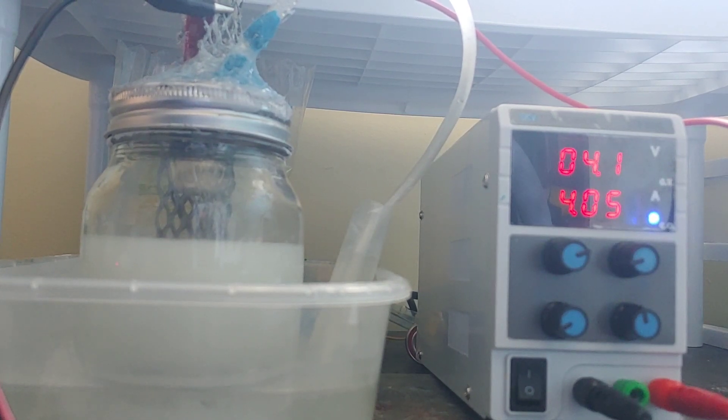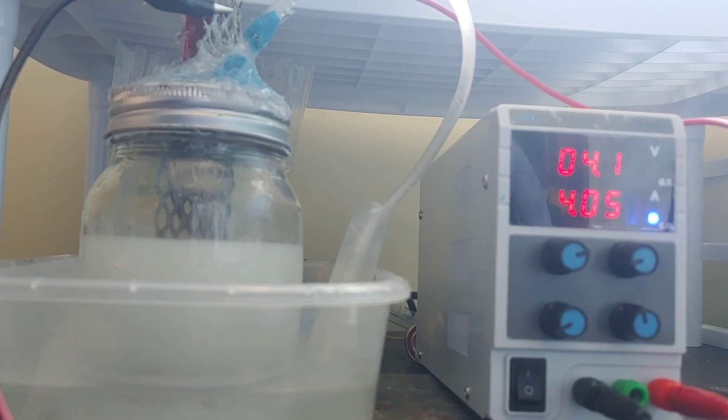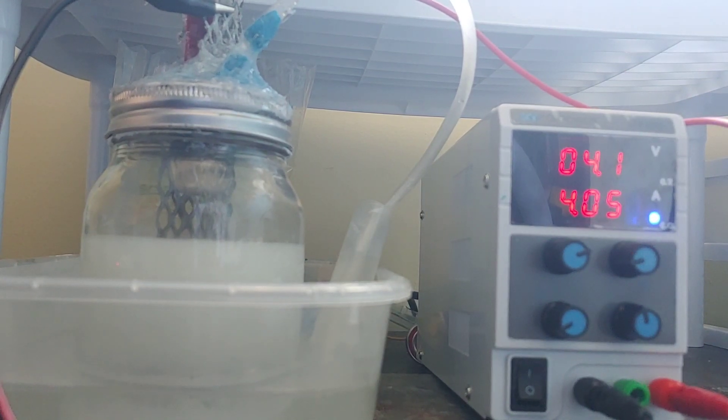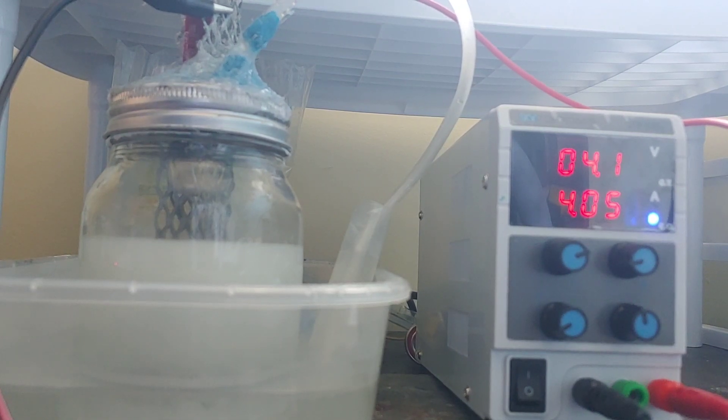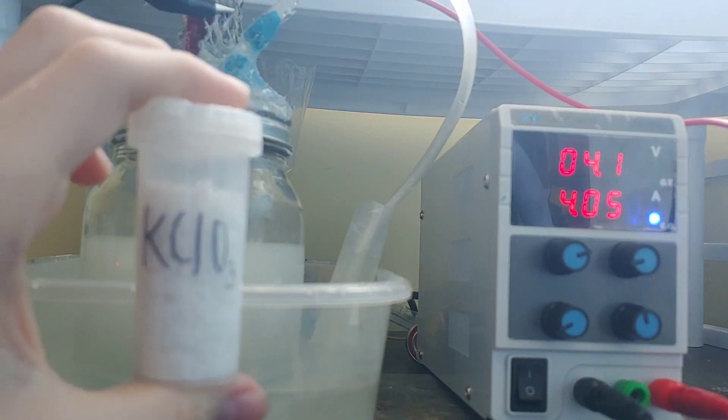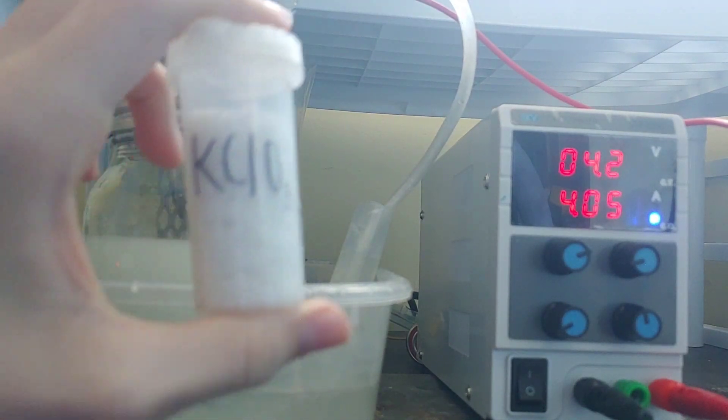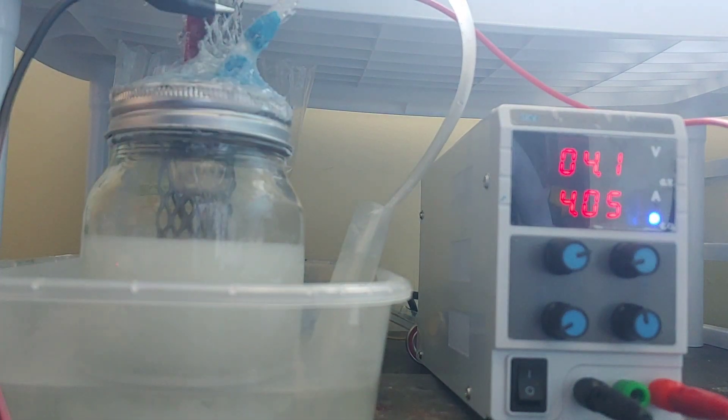So really, that's it for the whole cell. As you can see, I have, like, roughly 4 volts for 4 amps, which is great. One-to-one efficiency, am I right? So I'd say my thing is going pretty well. Now, of course, me saying that this burns is a nice statement, but I think you will prefer it to see it with your own eyes. So let's go burn this with some sugar.